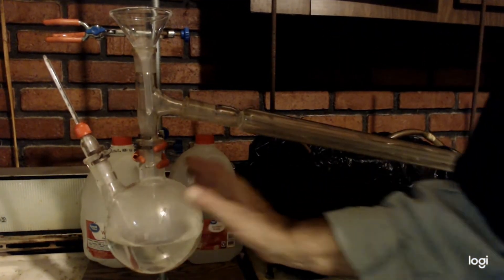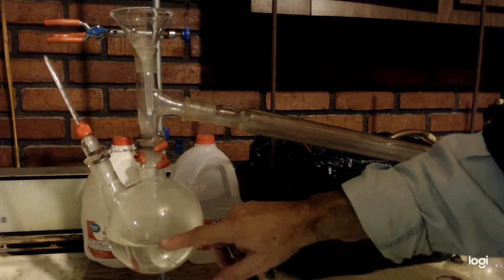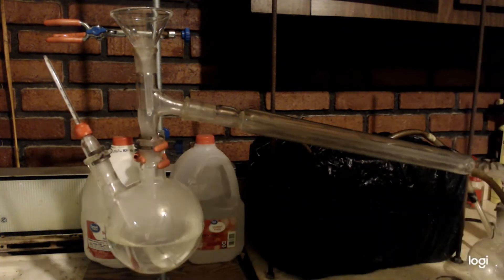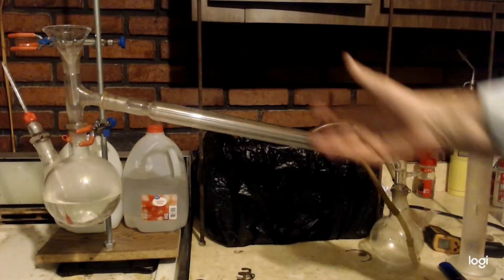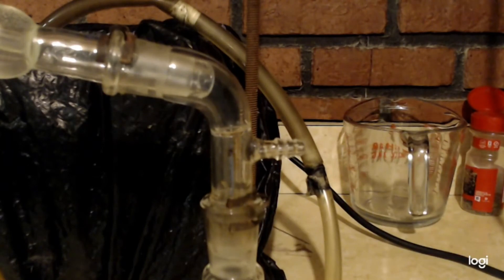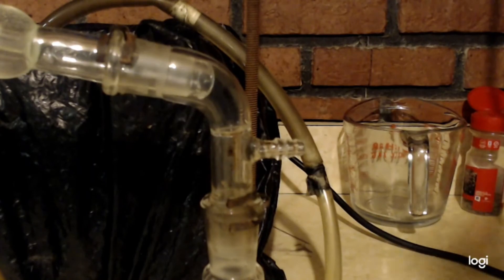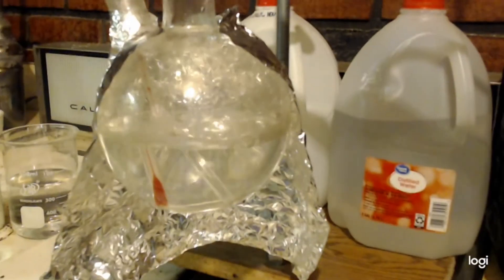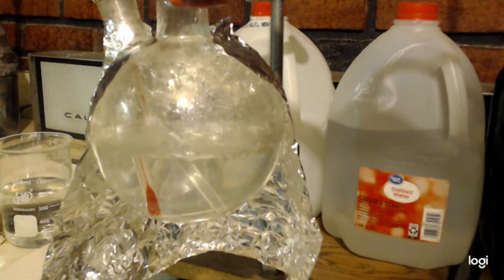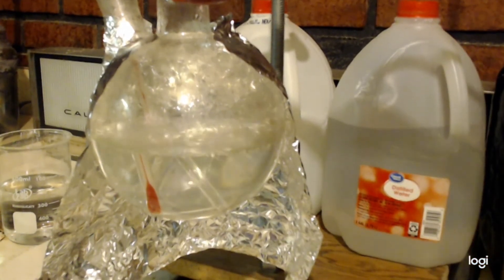Okay, now we want the, this thermometer here, the actual reaction part, to be at 100 Celsius. And then we can start distilling out. As you can see, we're already set up. Okay, so that took a long time to get this up, start distilling. I left it at 100 Celsius for a while. I couldn't get nothing to come over. Although it would come into the steelhead. As you can see, it's distilling now. I have the pot at 104 Celsius, and I'm going to keep it there. It's got a good flow. So basically, that's all I've got to do is keep it at 104 C.